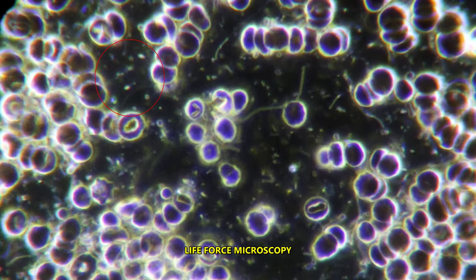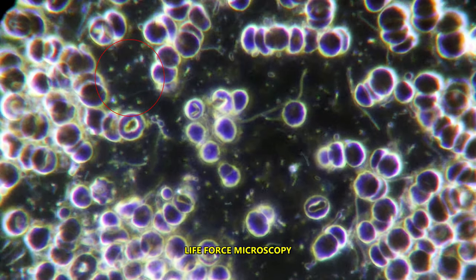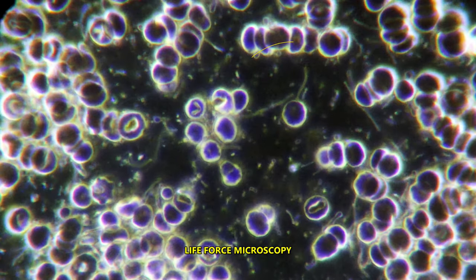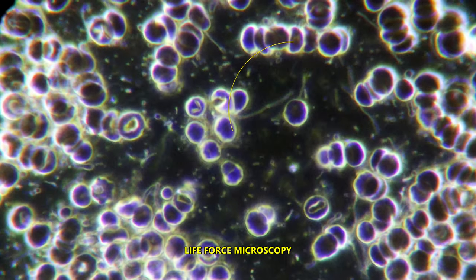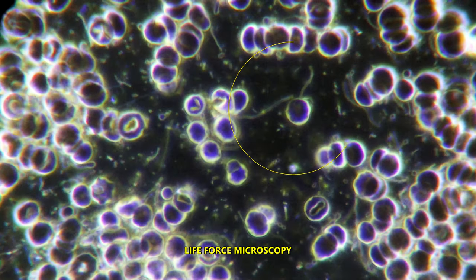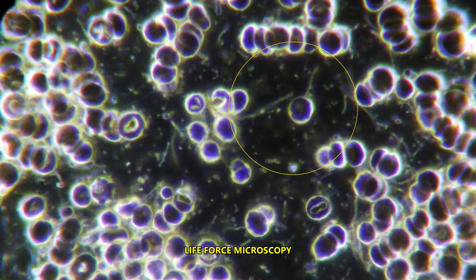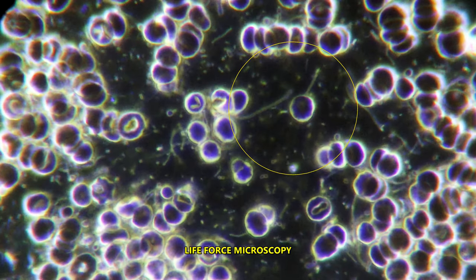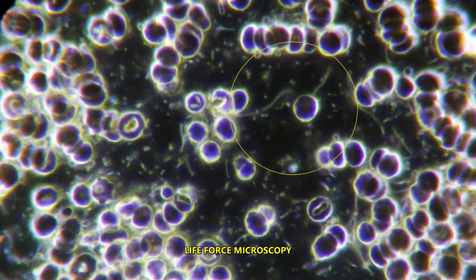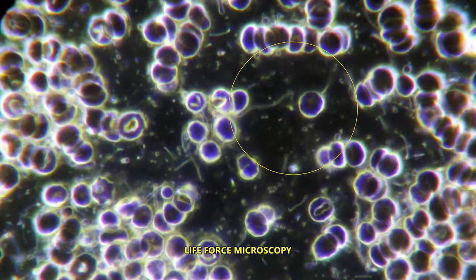Hello again, this is Christian for Life Force Microscopy. Today I'm presenting what seems to be abnormal blood and quite a few bacterial pleomorphic forms found in this sample of blood taken from a patient a few minutes ago, maybe 4 to 5 minutes ago. Within this yellow circle you can find these pleomorphic forms that look like parasites or snakes.